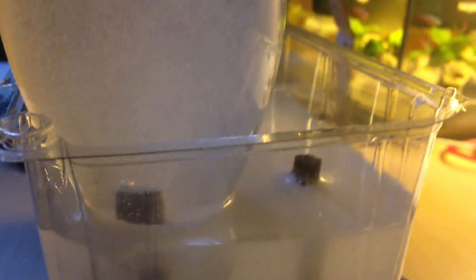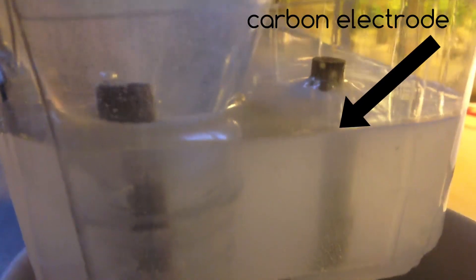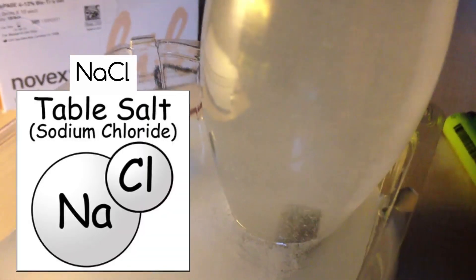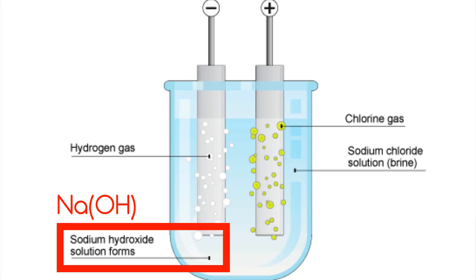It's because carbon is inert, so chlorine can escape instead of making some molecules with metals. Here you can see the electrolysis of salty water. Salt contains chlorine and sodium - so where does the sodium go? Simply, sodium reacts with hydrogen and oxygen and makes a small amount of sodium hydroxide on the negative rod.